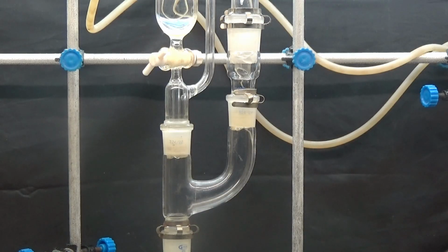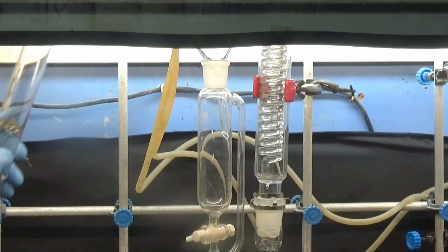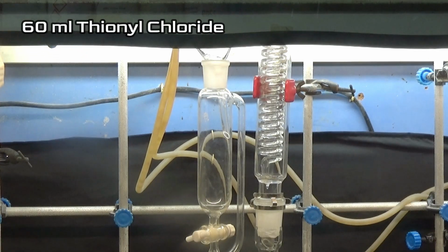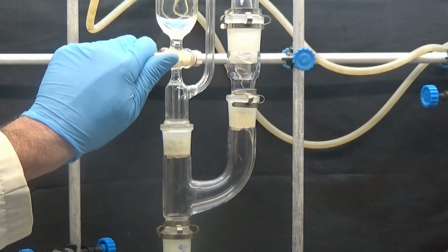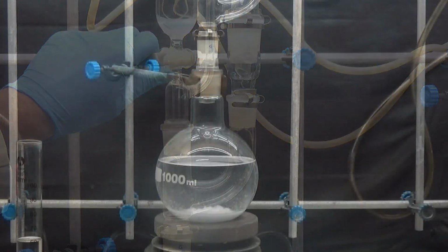We put a joint on the glycine flask with a 75 ml pressure equalizing addition funnel and a reflux condenser. In the addition funnel put 60 ml of thionyl chloride. Slowly add the thionyl chloride over the glycine solution with stirring.